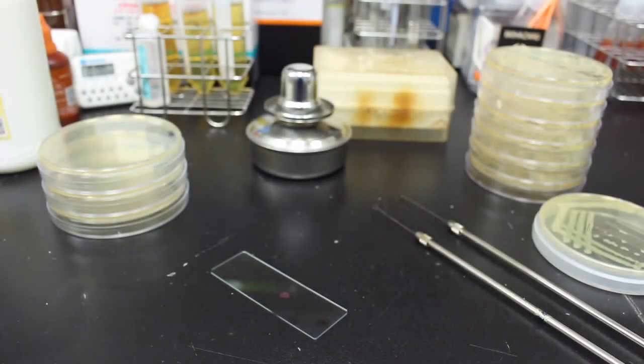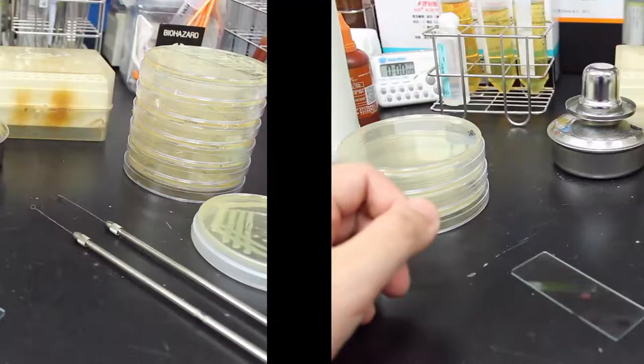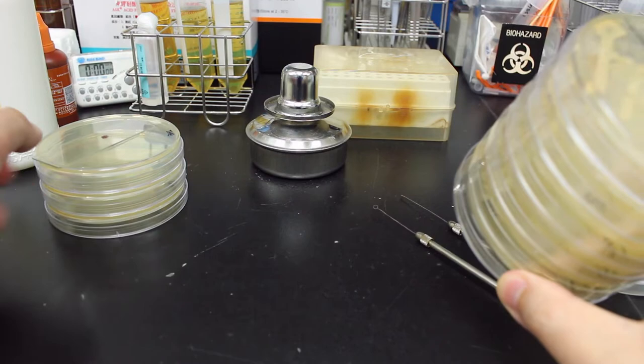Hello everyone, welcome to today's video. In this video I'm going to show you how to isolate bacteria, specifically Staphylococcus aureus. I found that there are a lot of videos on YouTube that teach you how to isolate bacteria.